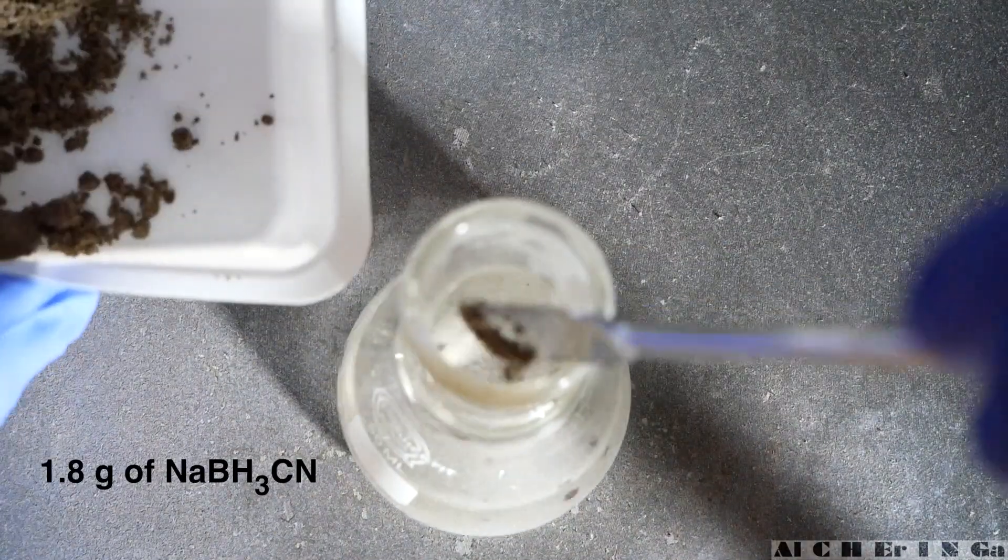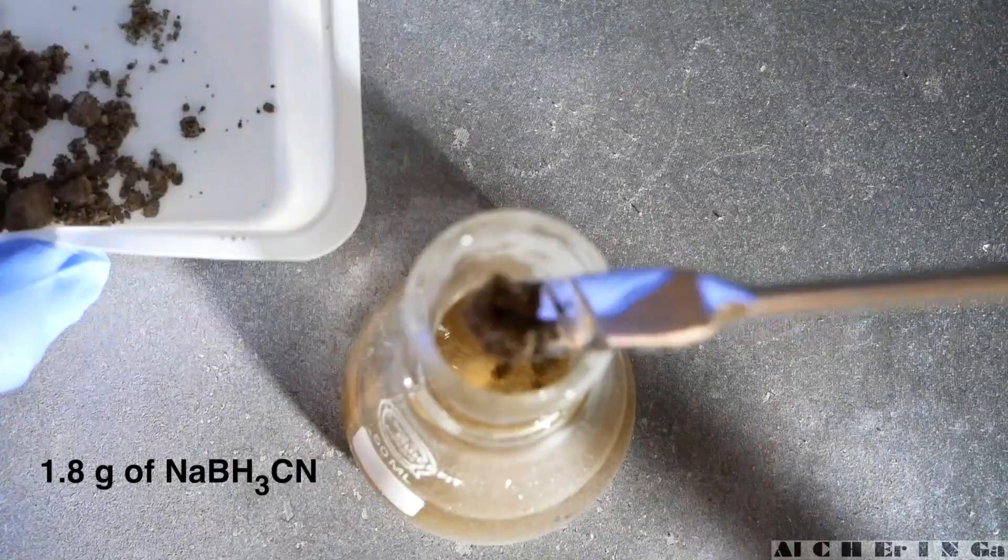Finally, carefully add 1.8 grams of sodium cyanoborohydride into the mixture.